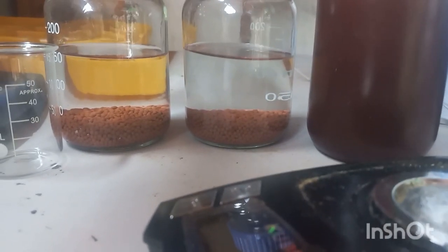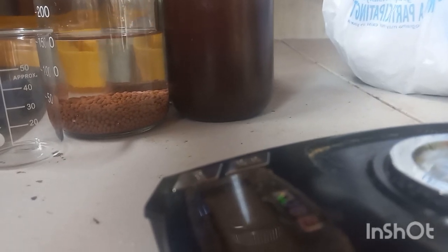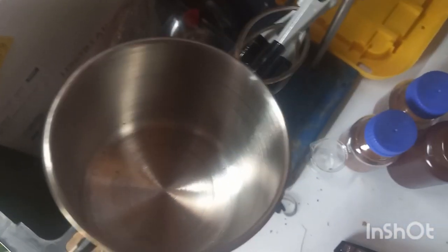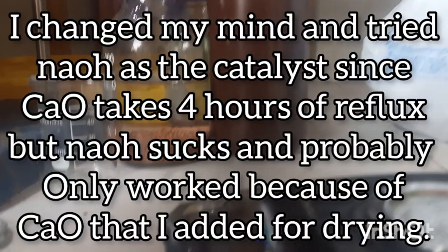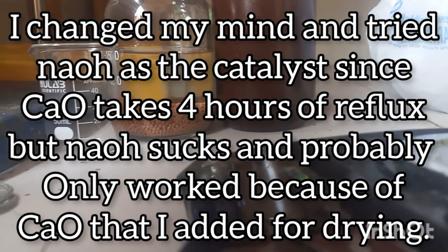I'm preparing this, but today we're also going to prepare the catalyst. This is calcium carbonate. We're going to throw that in this guy right here. I'm going to clean this out in a sec, but this is going to be my vessel to make calcium oxide.